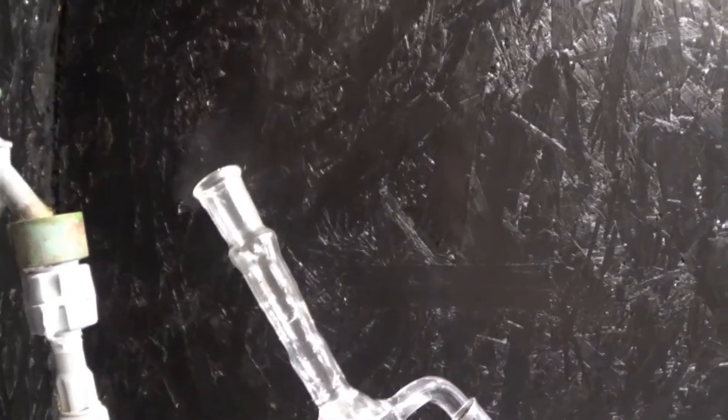Here you can see the formed hydrogen chloride fuming in the humid air of my lab. I hope this shot underlines how important it is that you work in a fume hood because of the toxicity of the HCl fumes.